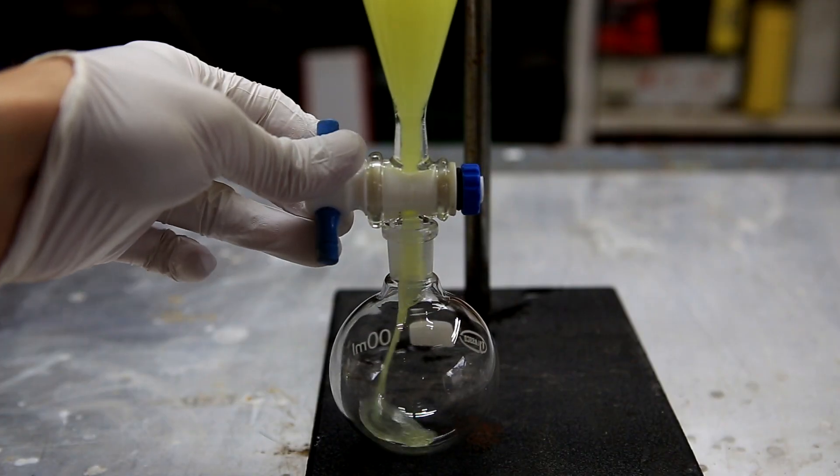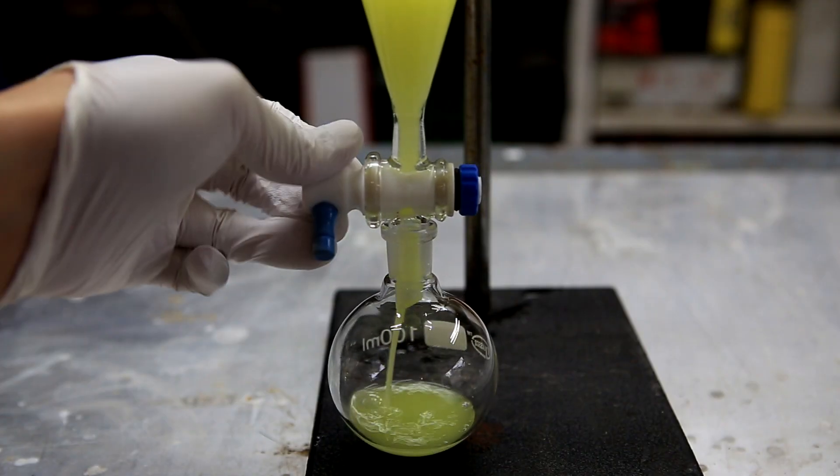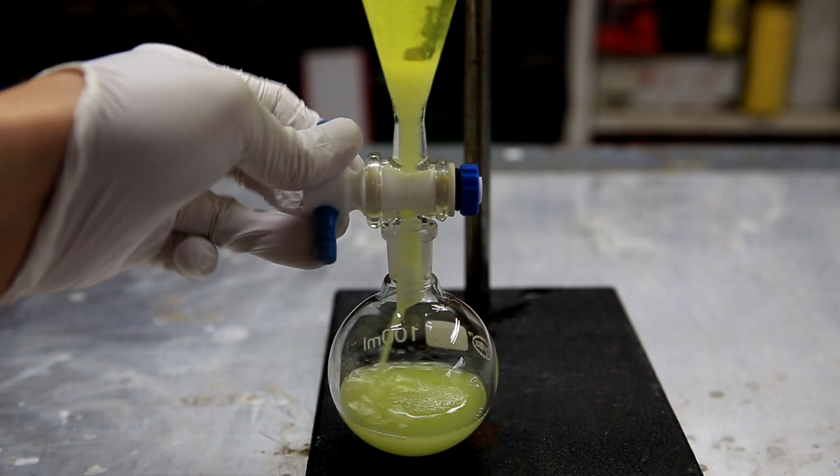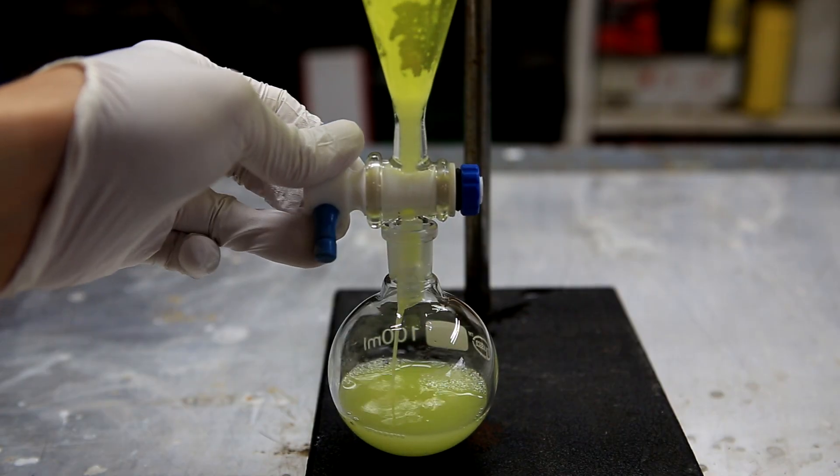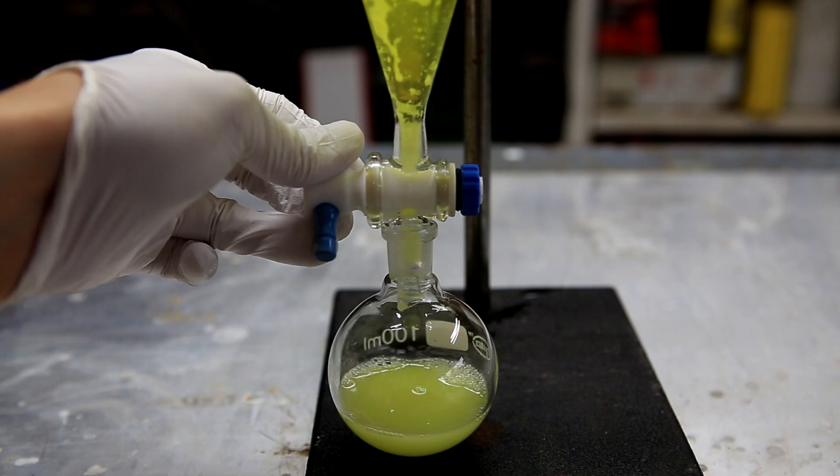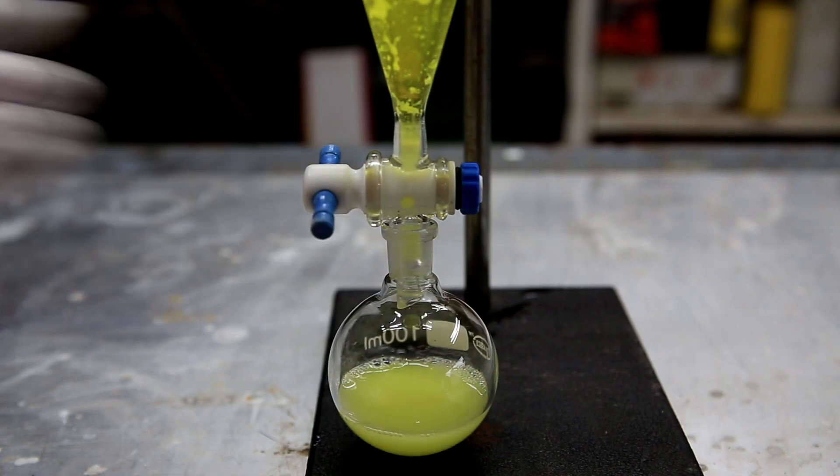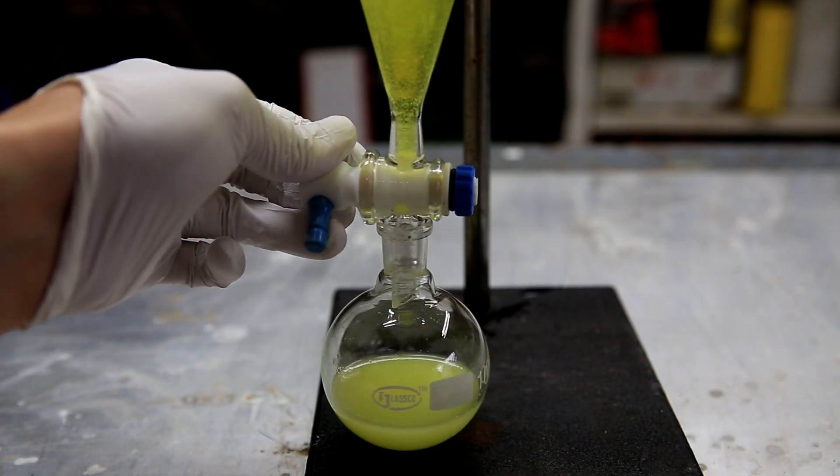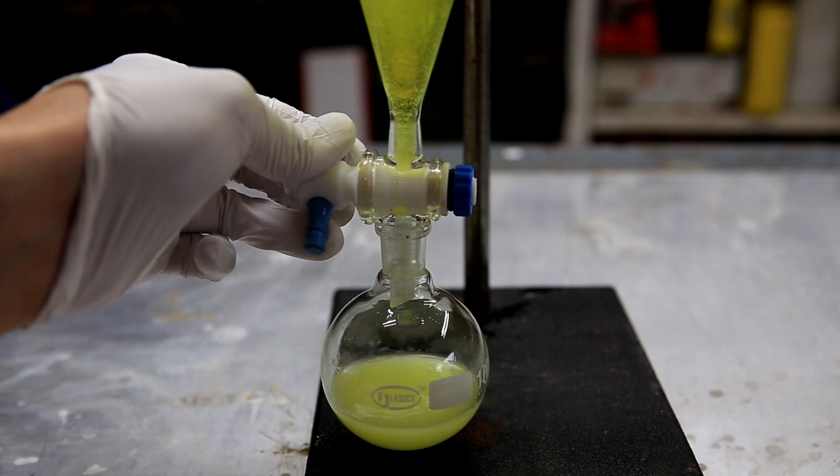After the final washing the nitrobenzene is transferred to a round bottom flask and due to the presence of water you can see that the solution is quite opaque. To further purify the nitrobenzene of water and of the di- and tri-nitrated product we're going to carry out a simple distillation.